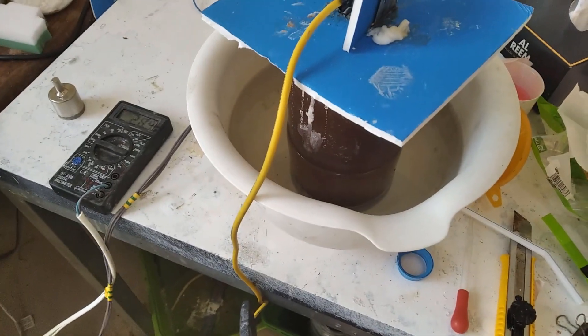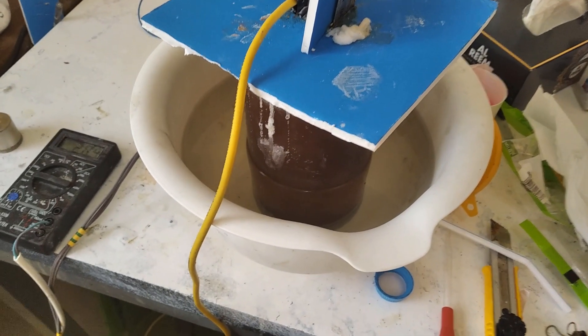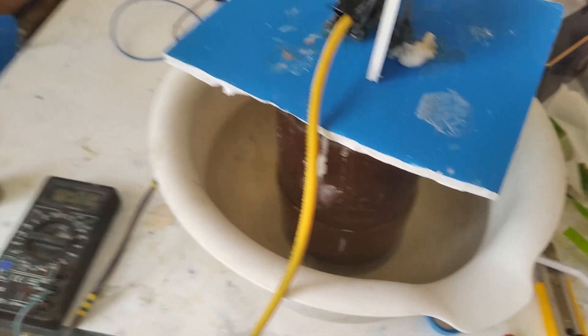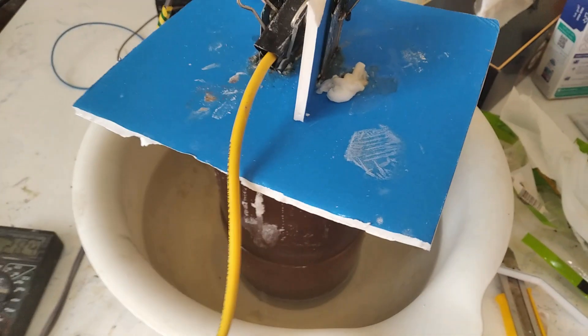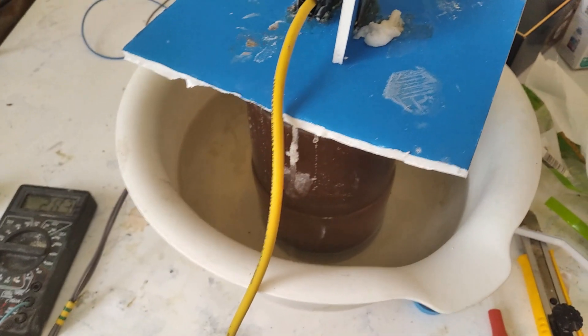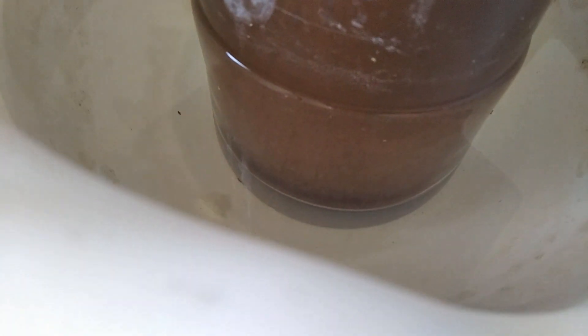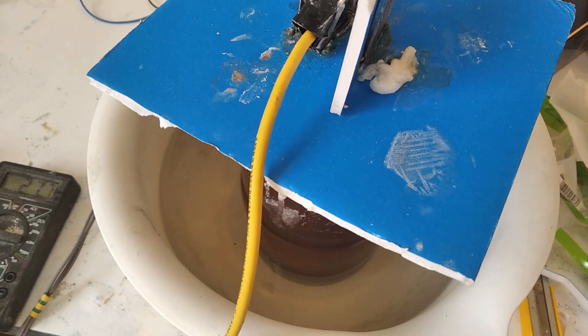Hello, this is from the hypochlorite cell. I'm trying to make it go all the way to perchlorate, and good news. It turns out that erosion will occur regardless - it will not occur if you stay within the chlorate-forming range, but if you start to get into the perchlorate-forming range, the erosion will occur with a vengeance. However, there's not a lot of dark deposits at the bottom. This is simply all superficial, which suggests that this type of process is actually quite good.